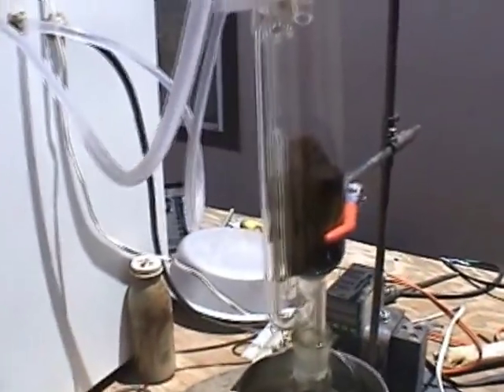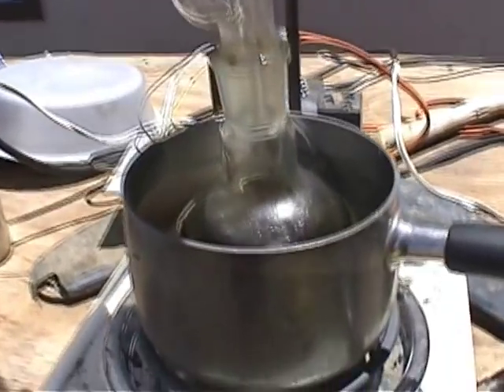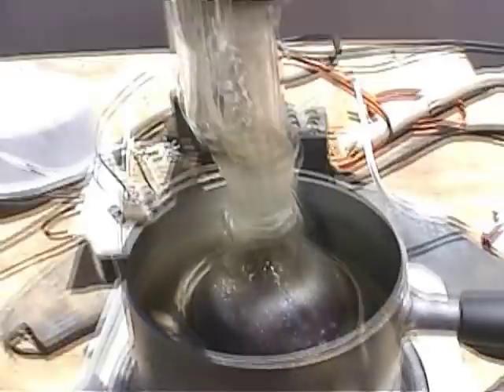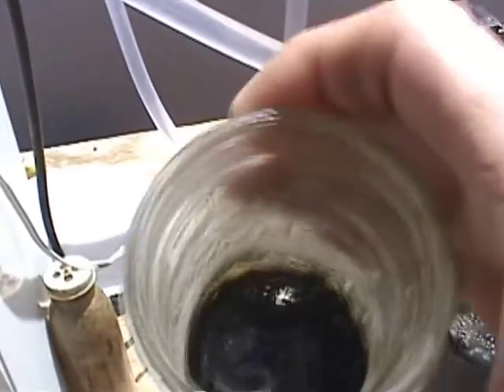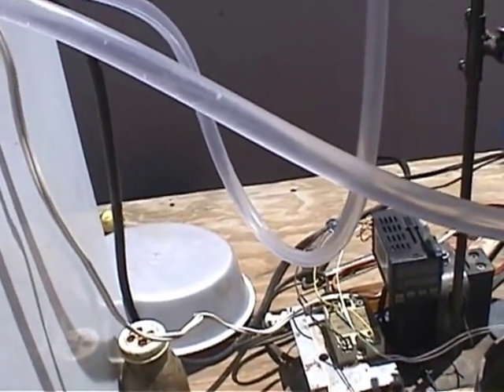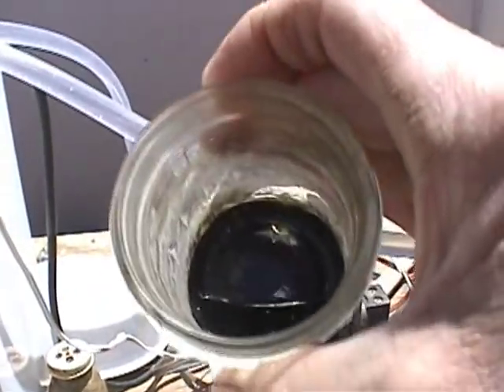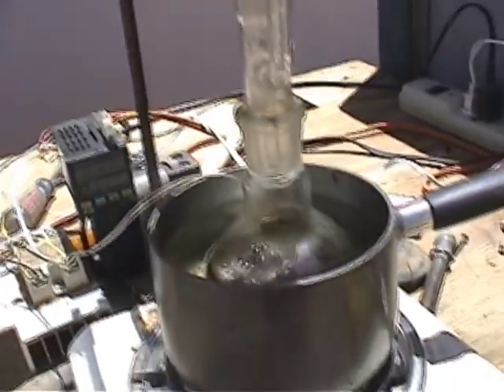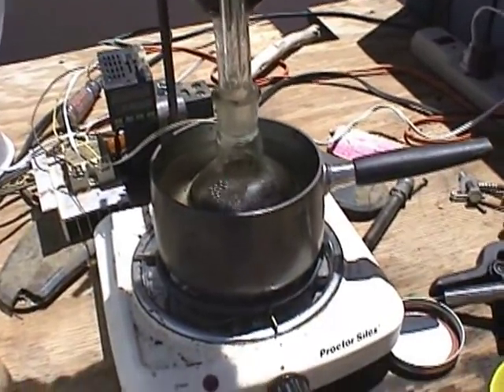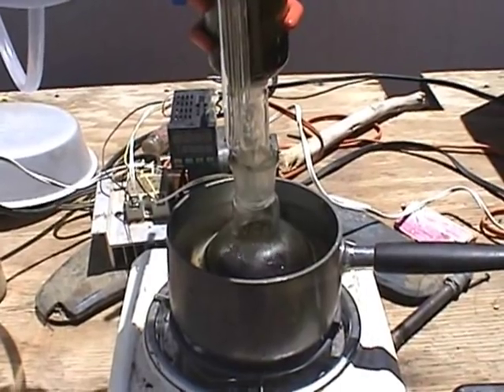I'm back. It's been running for a couple of hours. You can see the drip rate is pretty decent, and the boiling is going on at a pretty good rate. My dry-out jar has a little ways to go — I can still detect a little bit of acetone in there, so it's not quite ready. It's fairly liquid right now, but I'm sure there's a little bit of water from condensate in there. Once it gets a little more solid I'll let it sit, and it'll get to be a really heavy, tar-like consistency.